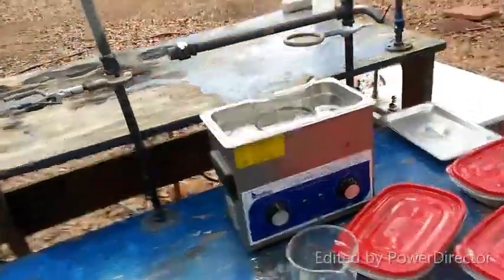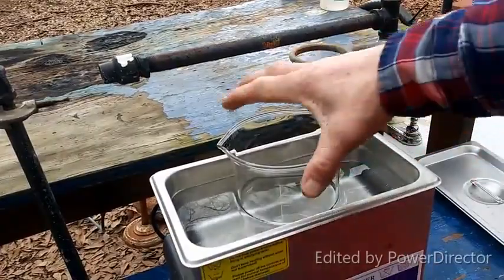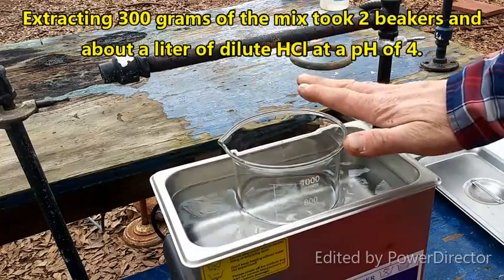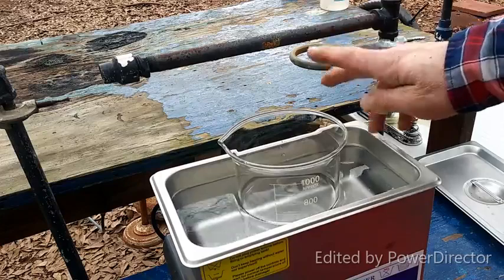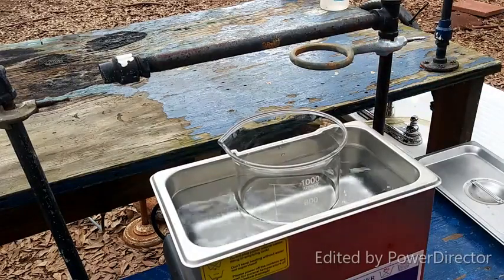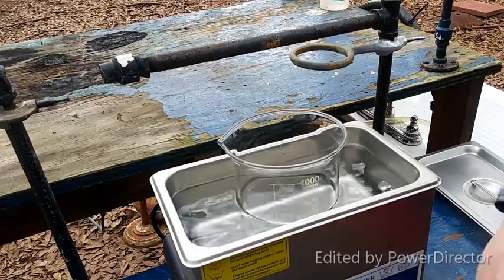What I've got here is about 600 mL of distilled water whose pH I have adjusted to 4 as measured by pH paper. I lowered the pH using plain old hydrochloric acid — nothing fancy. We want to keep production costs as low as possible while still obtaining a very high quality product.